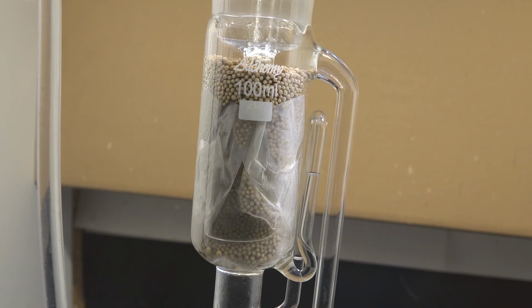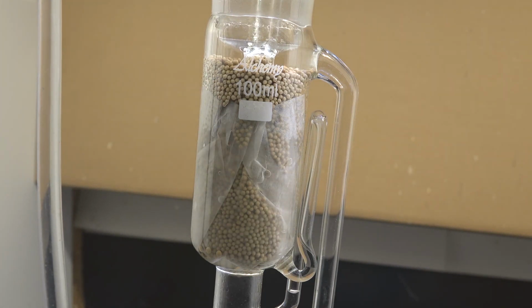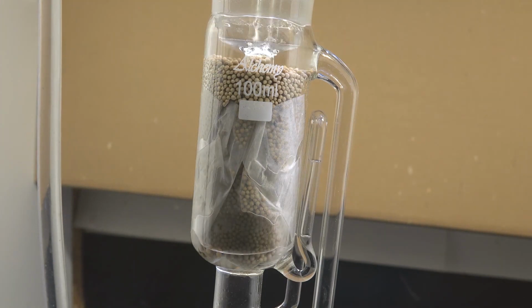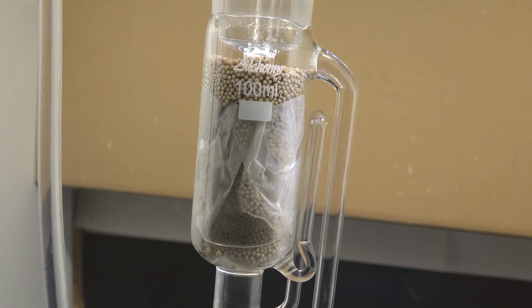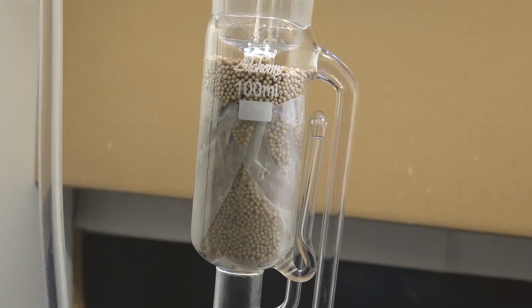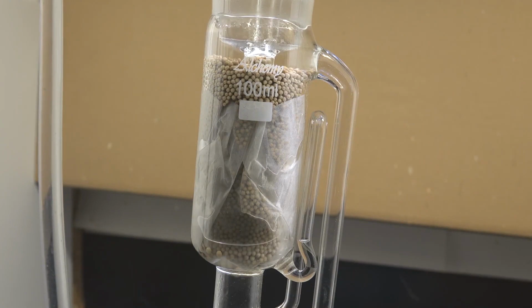Now at this point you might be wondering what happens with the acids. Propionic acid and sulfuric acid are too polar and too high boiling, so they don't vaporize and condense into the Soxhlet apparatus. Thanks to the Soxhlet extractor, we can use them for the reaction without actually using them in the reaction. In a way, we've built a mini chemical plant where we have two separate processes running, Fischer esterification here and water removal over here. Anyway, I'll let this run overnight.